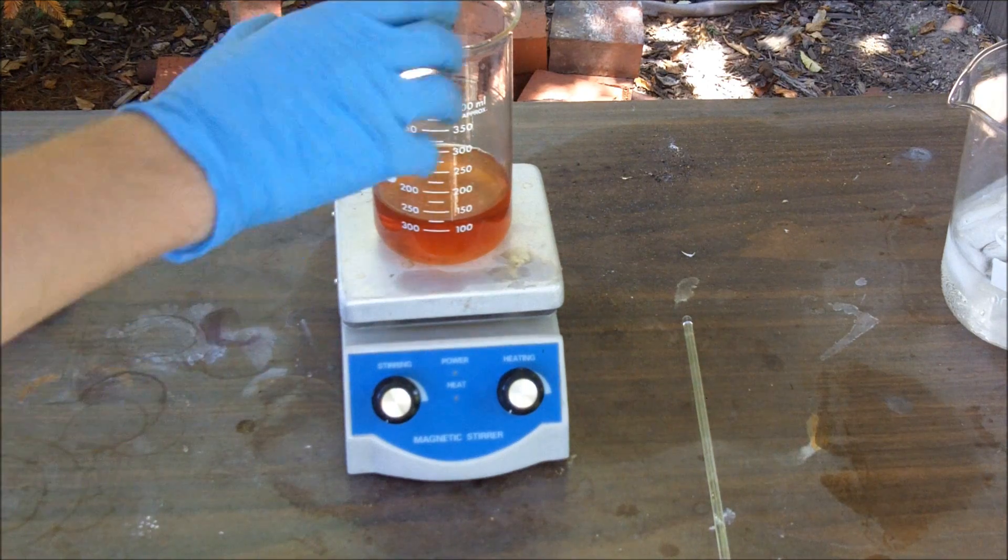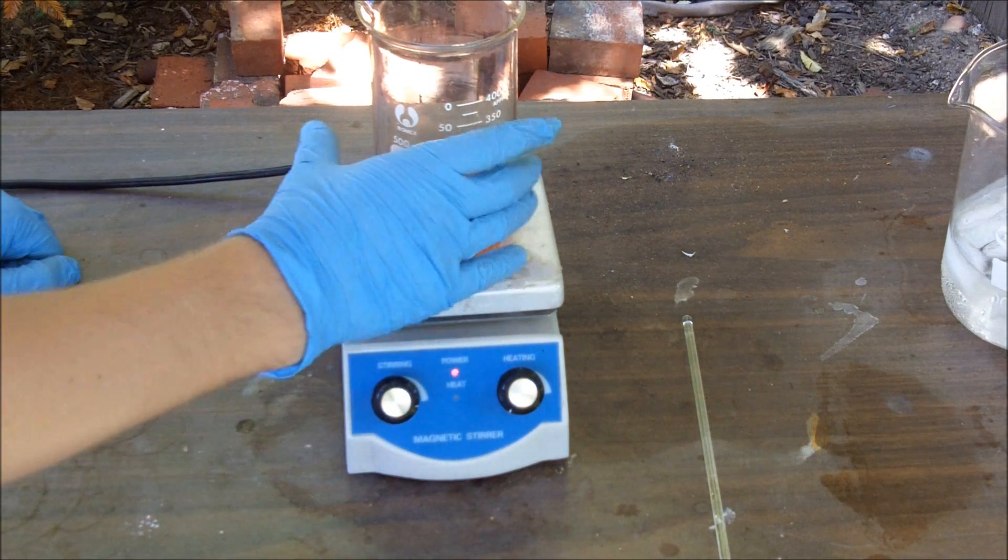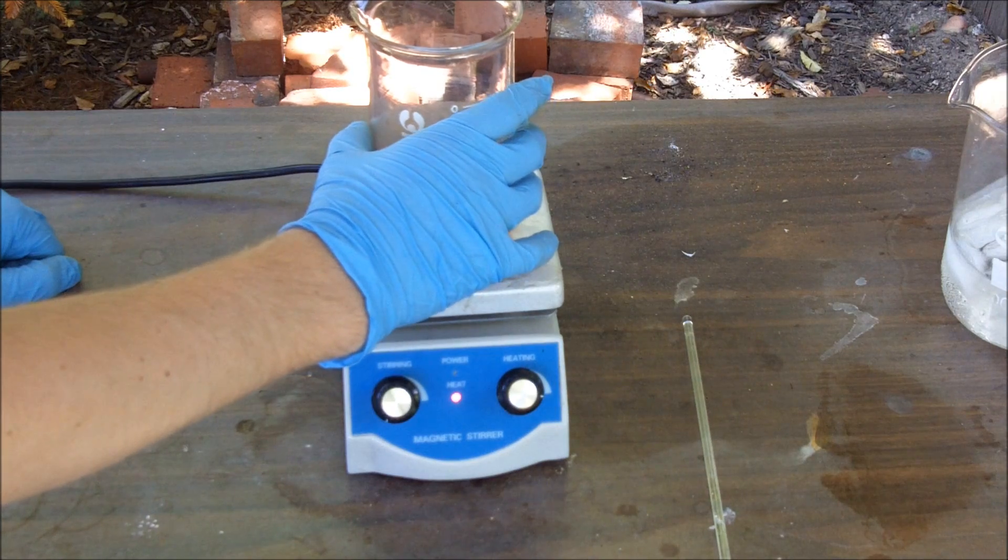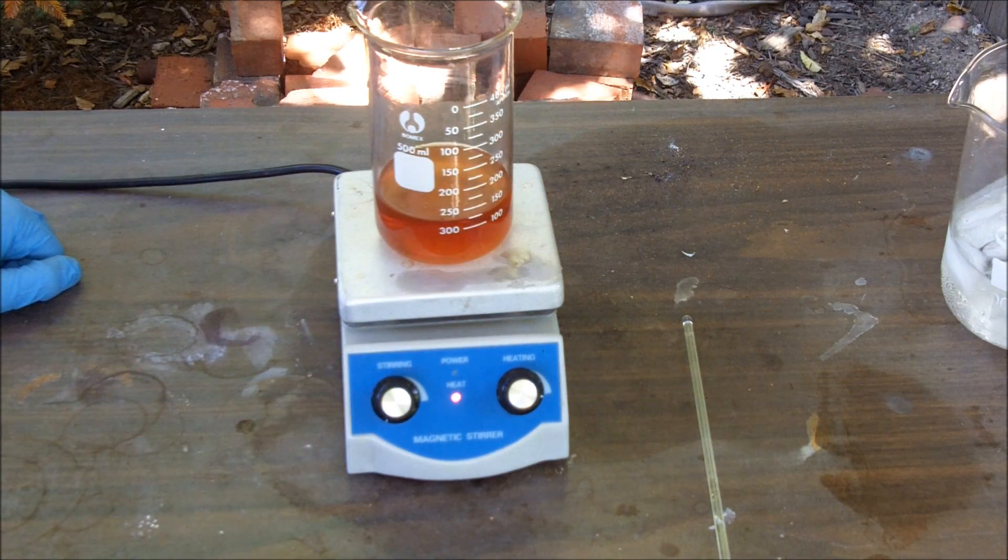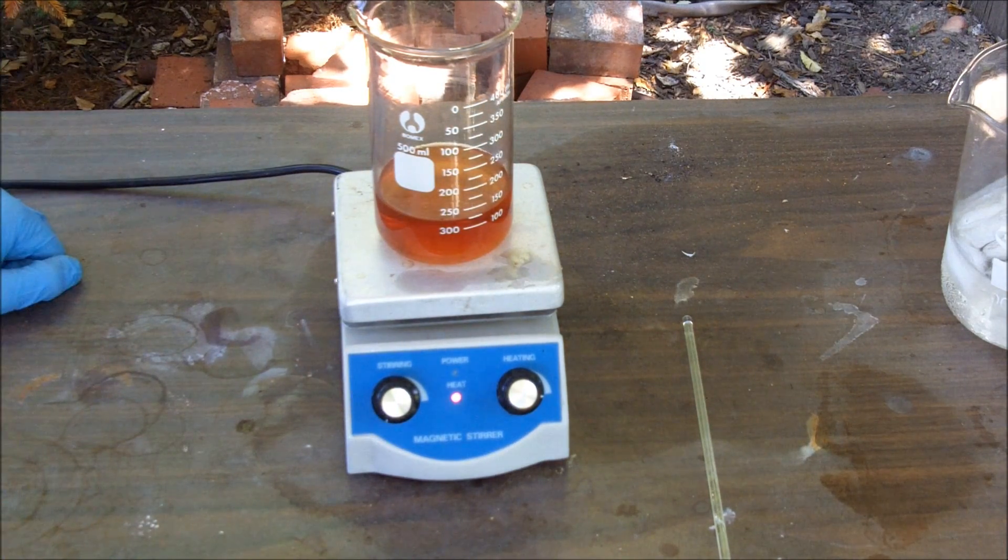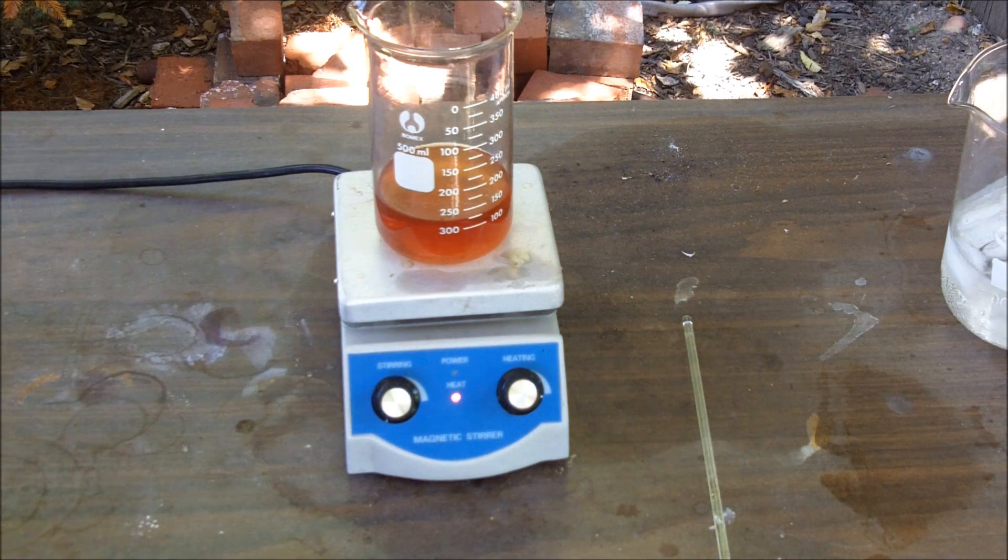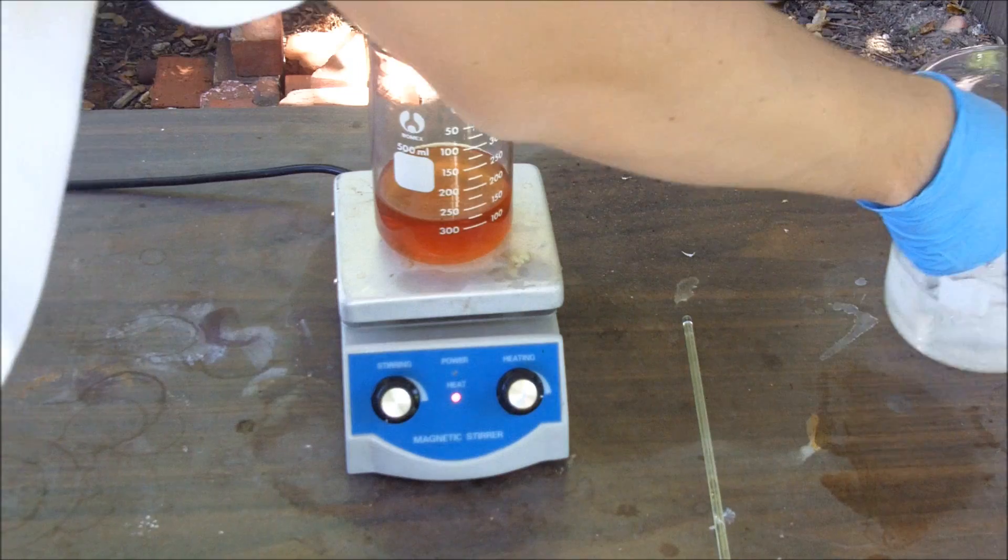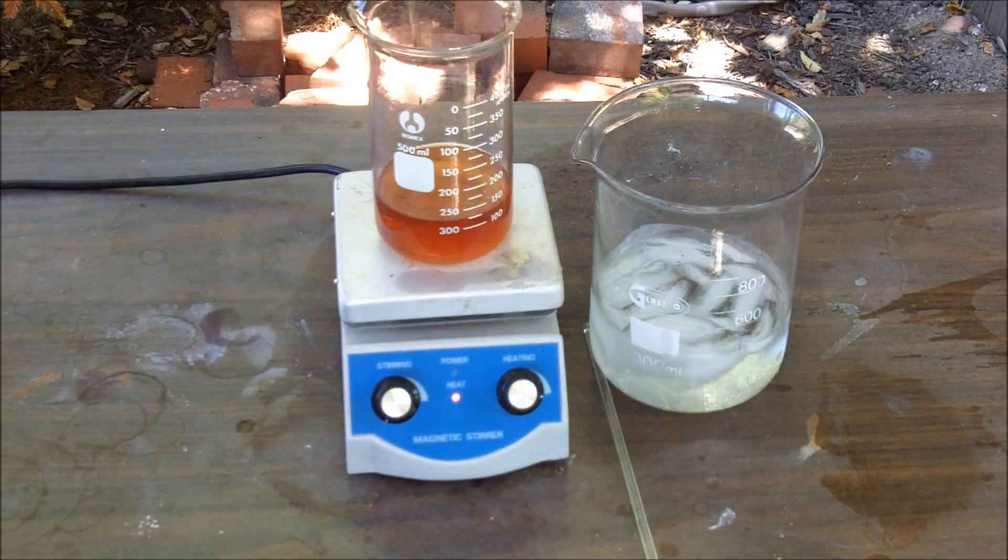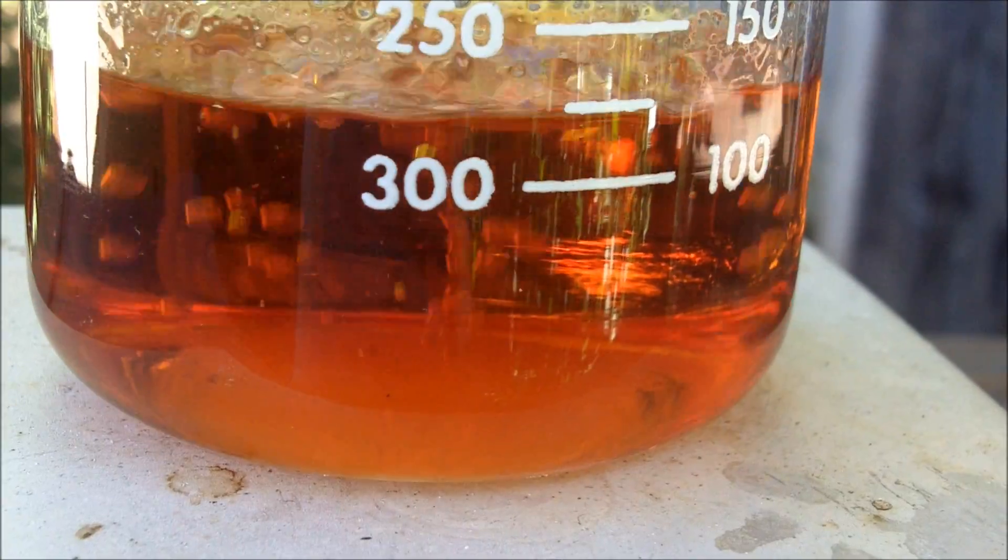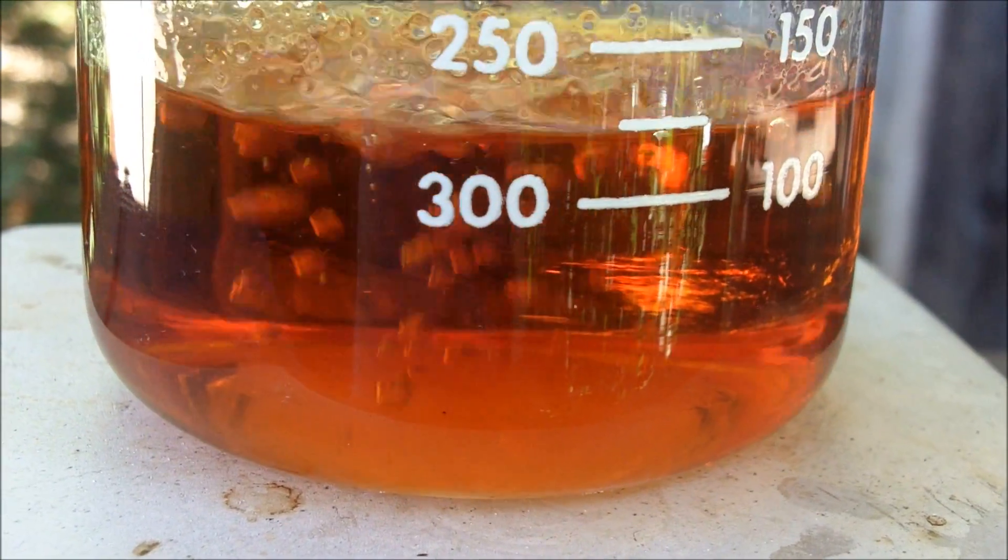Now that I have added the ketazine to the acid, I am going to heat up the mixture to drive off the methyl ethyl ketone and drive that reversible reaction forward. This will produce hydrazine sulfate. After it has boiled down a bit, I will add it to this ice bath here to crystallize the hydrazine sulfate and then vacuum filter. And we can see it boiling pretty nicely now.